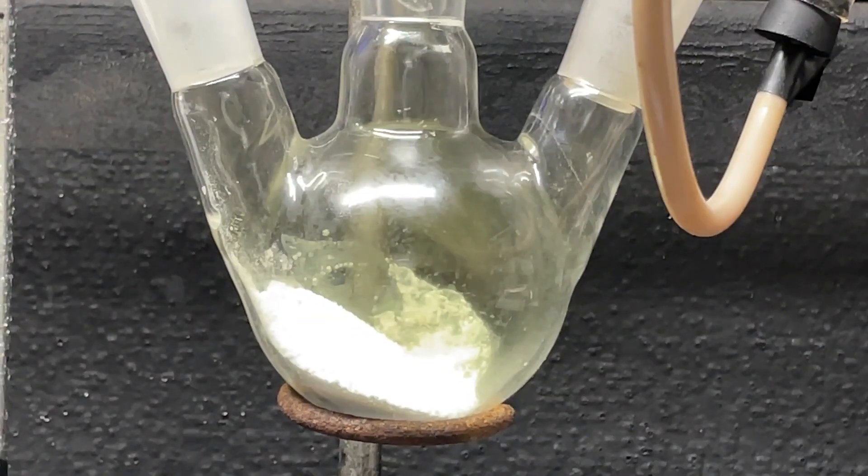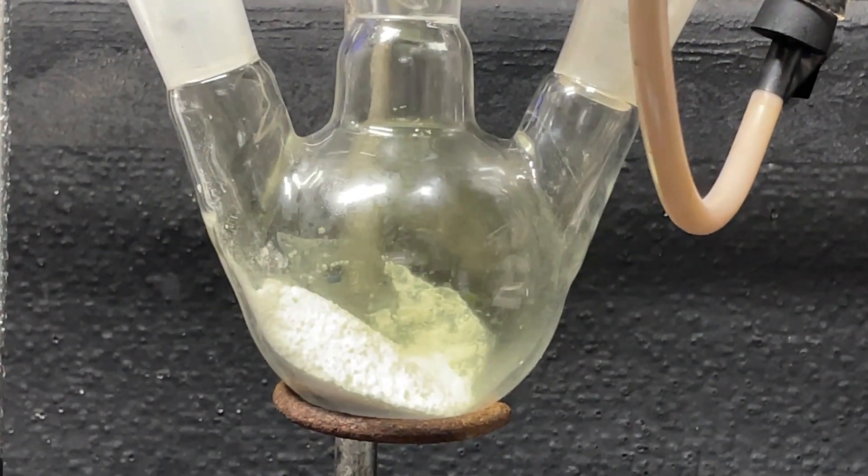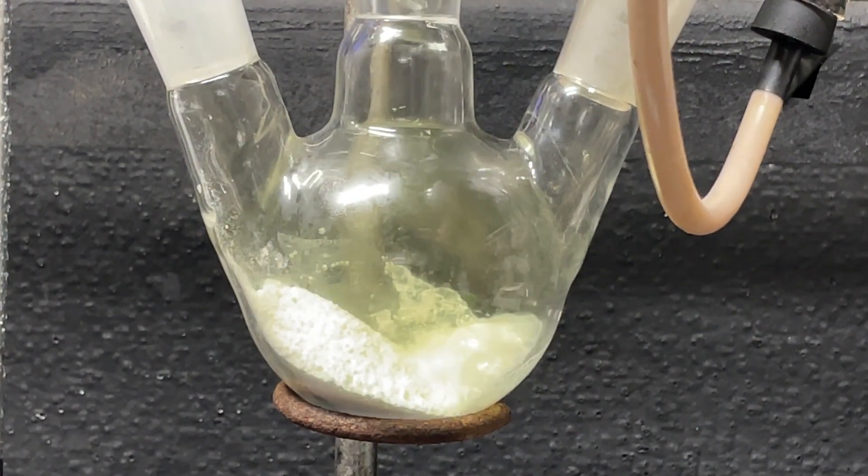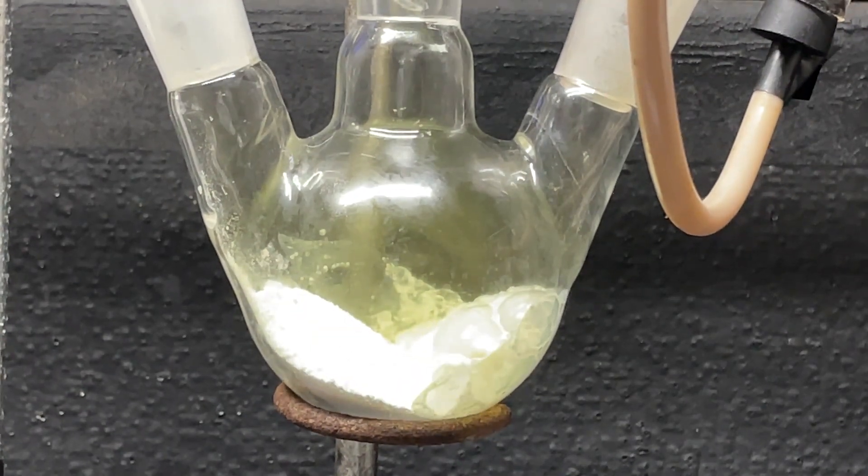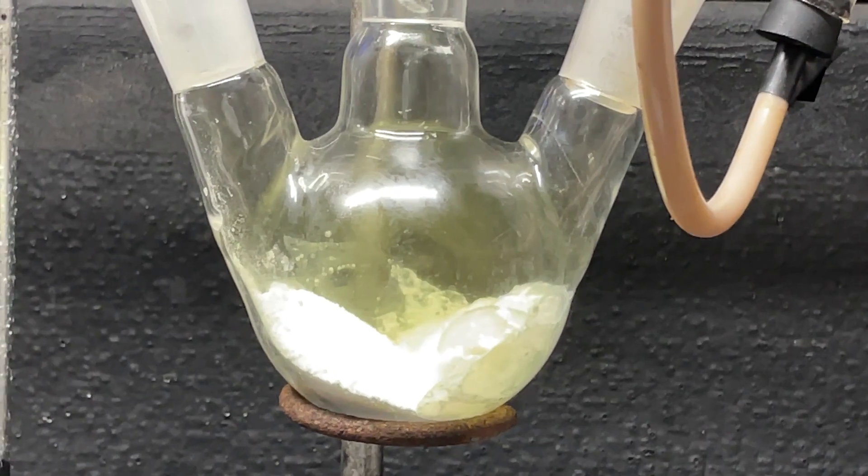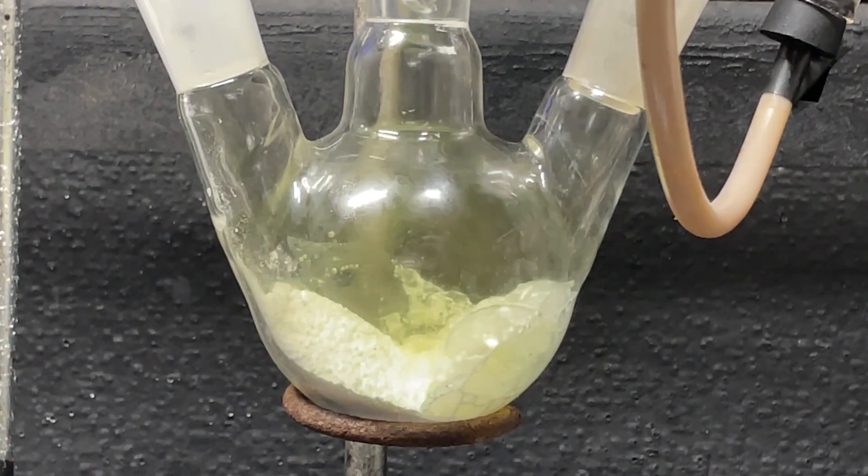Okay first thing I'm going to do is drip a small amount of HCl on our TCCA. As you can see it is producing chlorine gas immediately. And we'll add a little bit more.